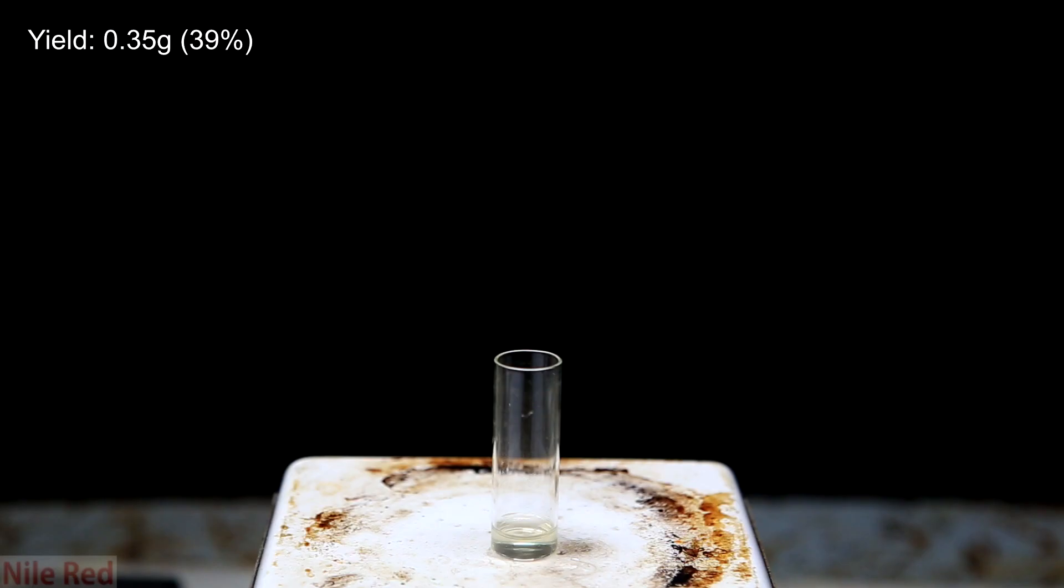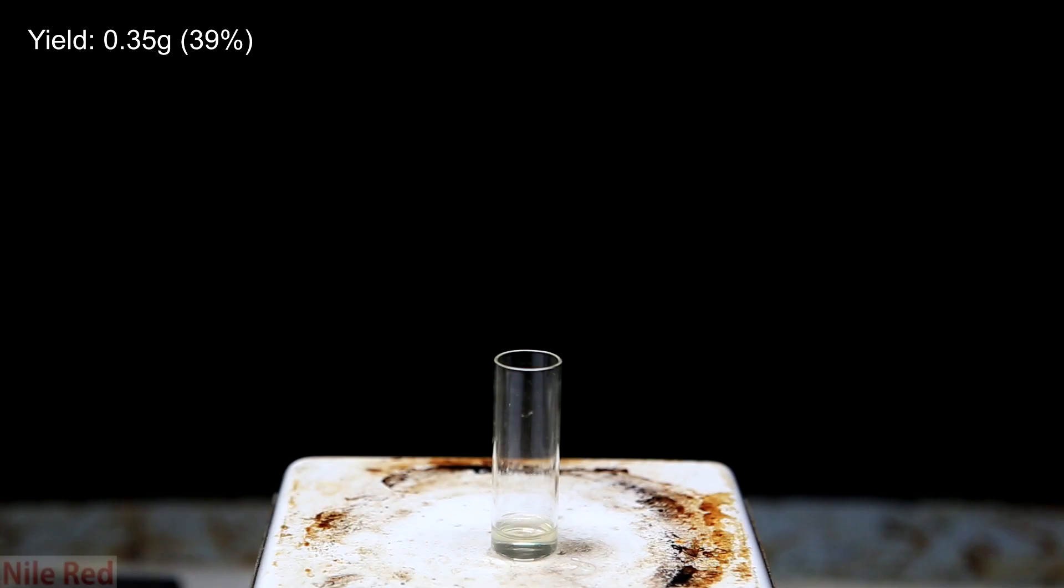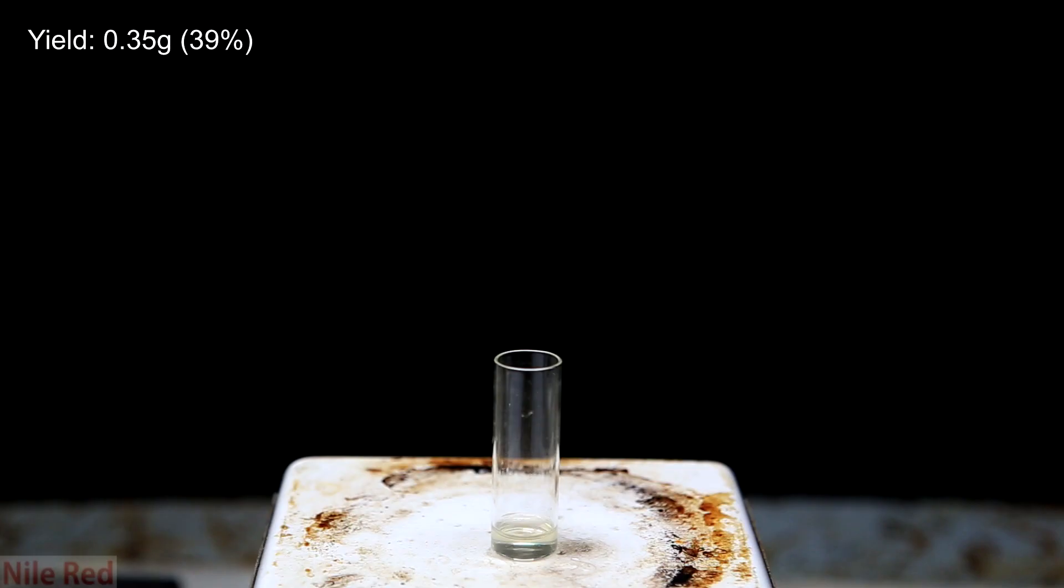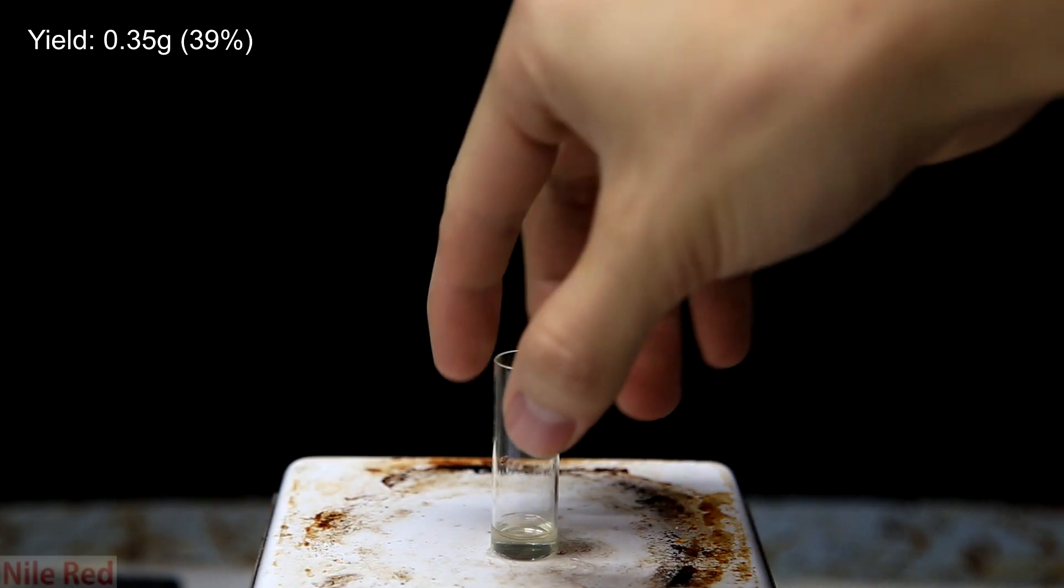This reaction got a little messy at the distillation step so the yields are pretty measly 0.35 grams. Like I said before though I really don't have a use for this product and this was just an exercise of going over the Birch reduction.